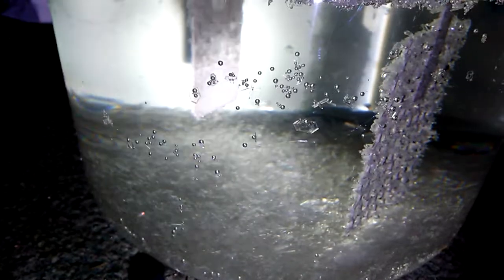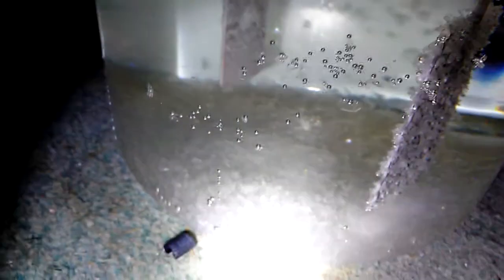I'm using a platinum electrode and a stainless steel ruler for the cathode — whatever works, right? Those crystals are huge, big, beautiful potassium chlorate.